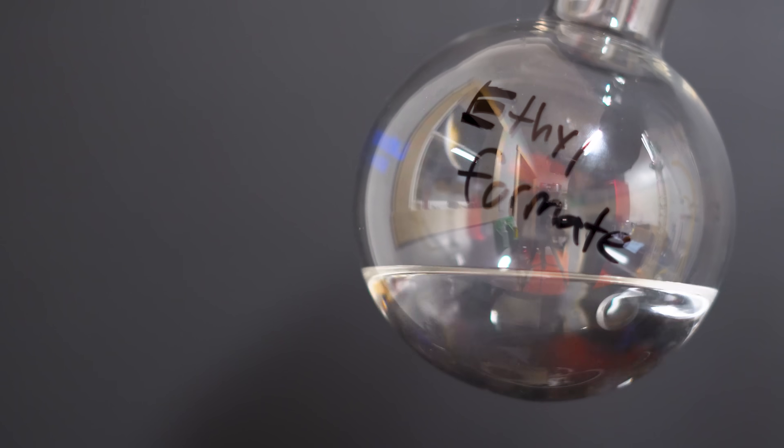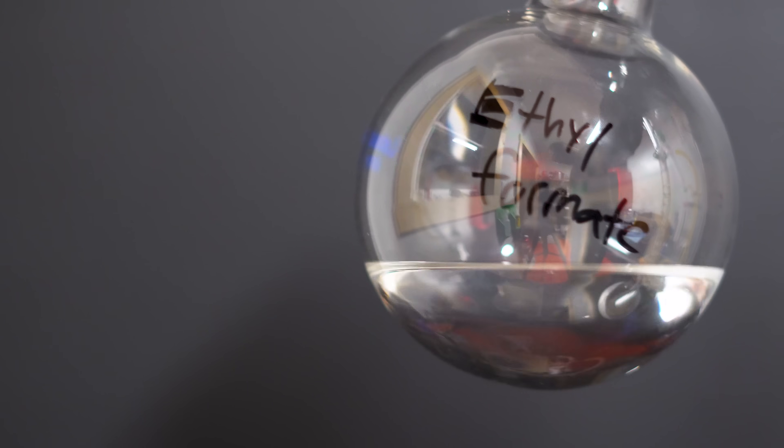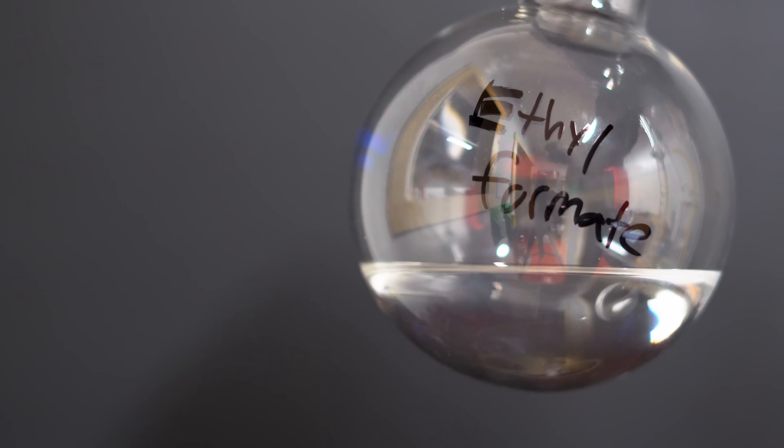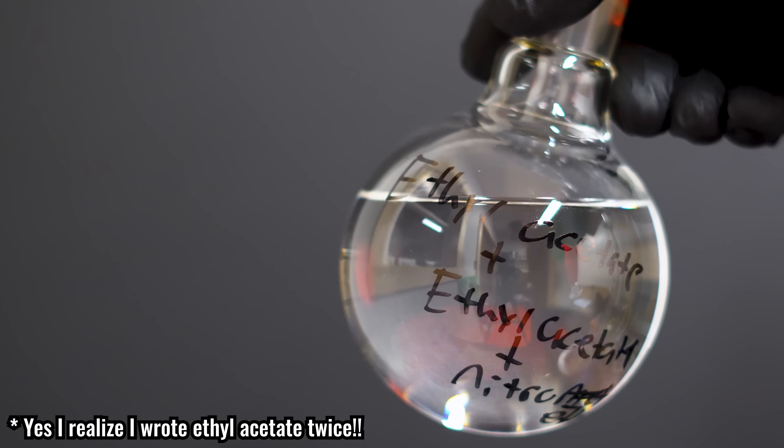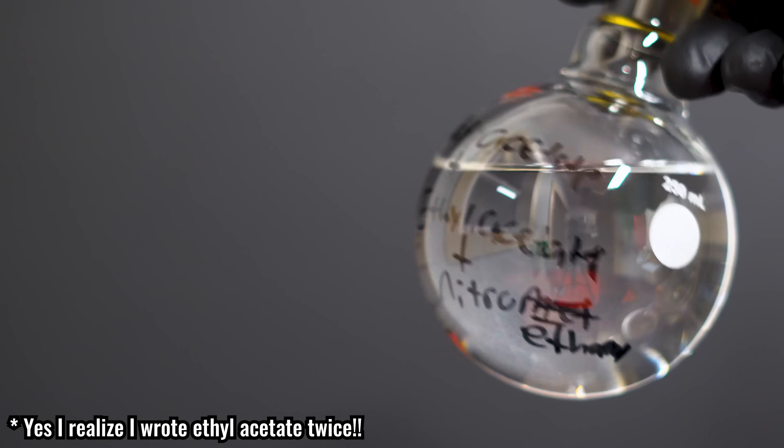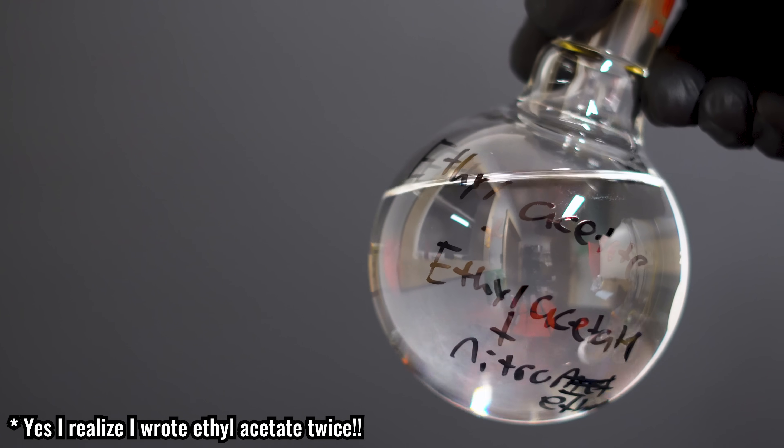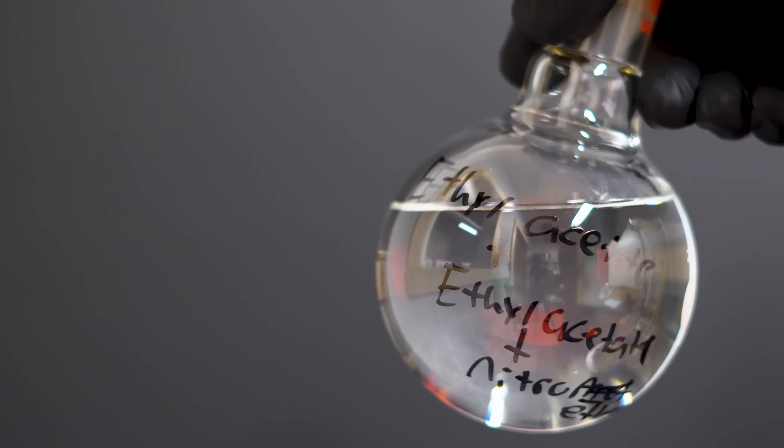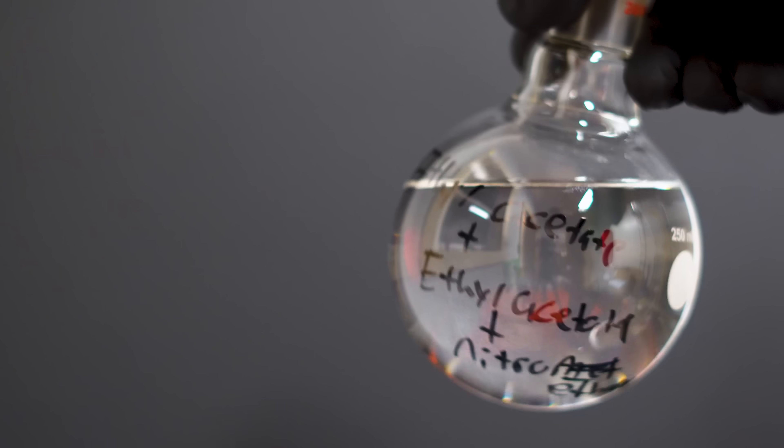Our first fraction that we collected all the way up to 70 degrees Celsius should be our ethyl formate. Ethyl formate can be pretty useful, and it has a characteristic smell of rum. The middle fraction is likely ethyl formate, ethyl acetate, and probably a little bit of nitroethane. Like I mentioned before, I'm going to pour this back in the bottle and refractionally distill.